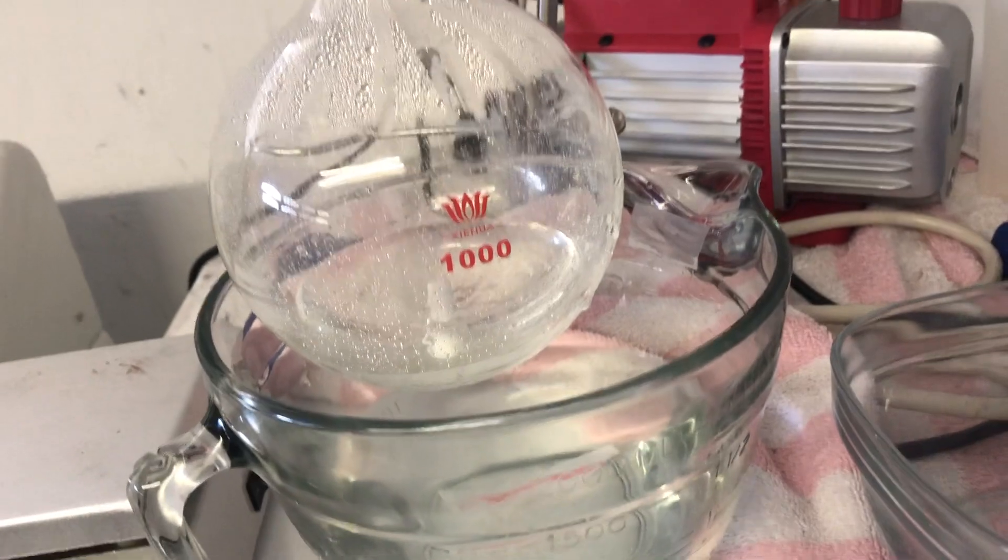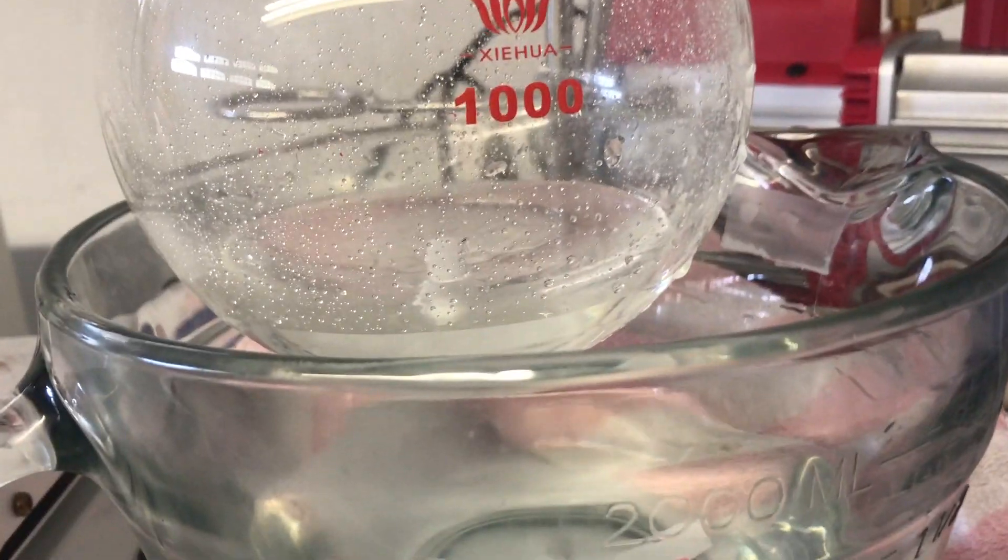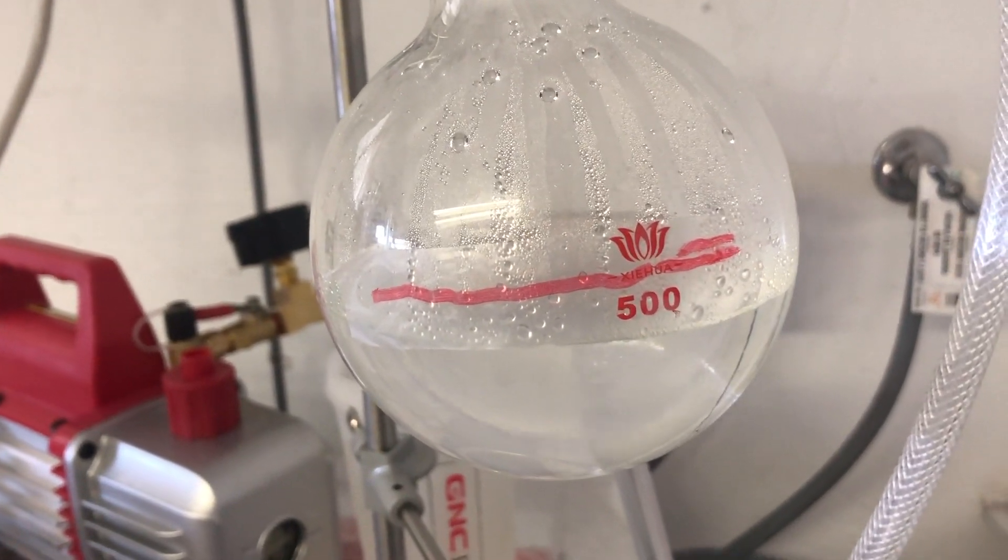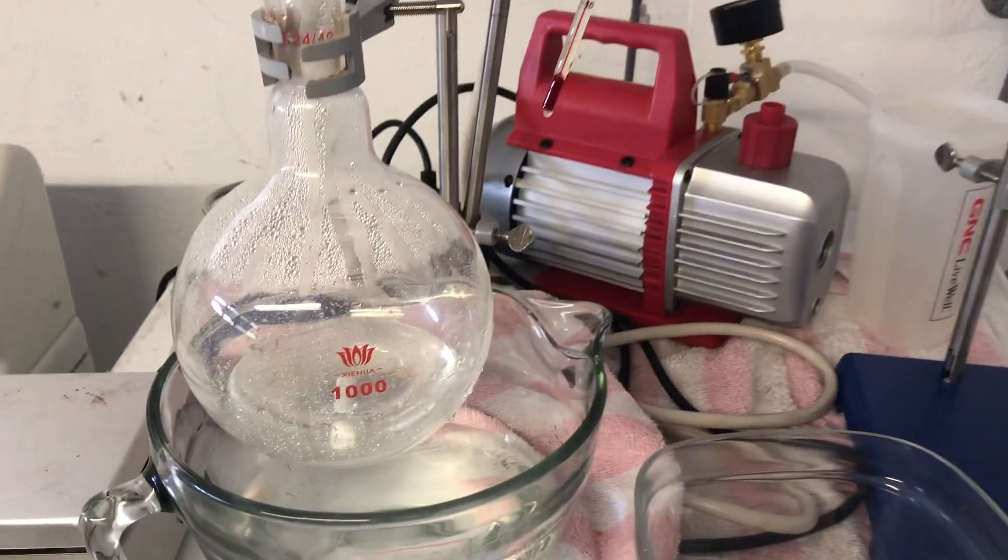So I ran it for a few hours at about 50 to 55 C. About that much left. Probably need to take a little bit more. I'm a little bit shy of how much we want to pull out. But I'm gonna check it and take a look.